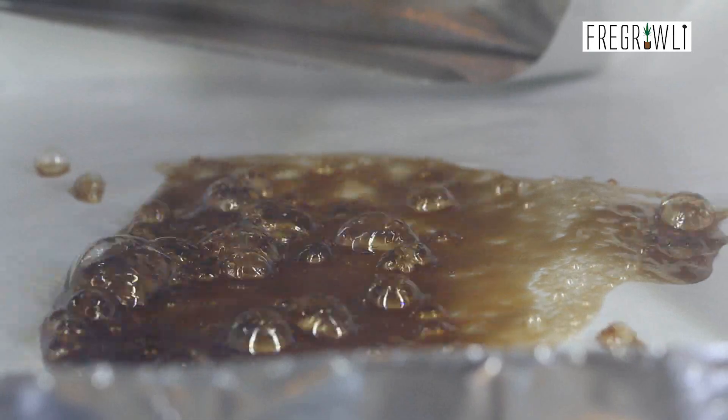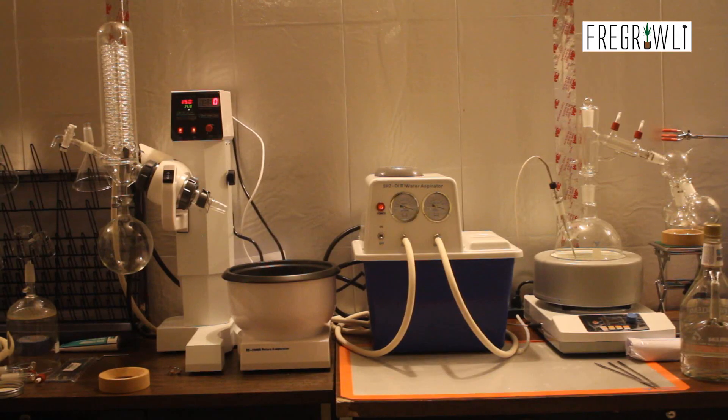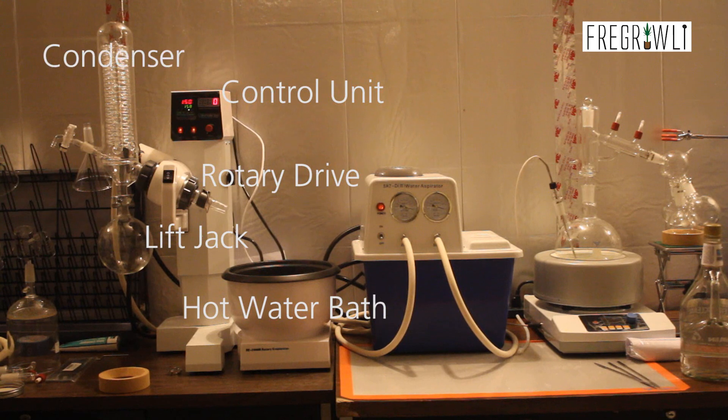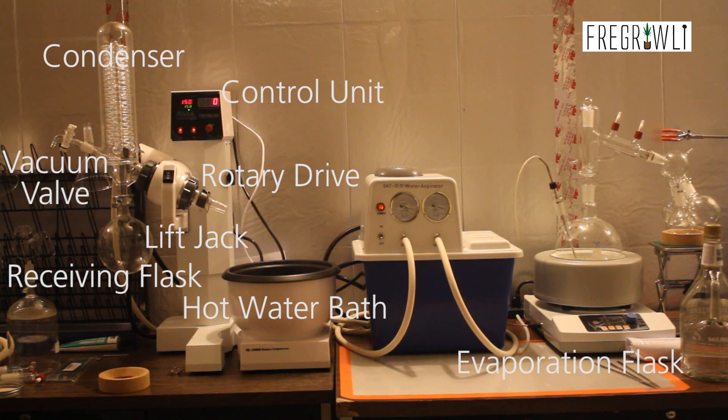There are eight basic components to a rotovap: the control unit, the rotary drive, the lift jack, the hot water bath, the condenser, the receiving flask, the vacuum valve, and as you see here, the evaporation flask.